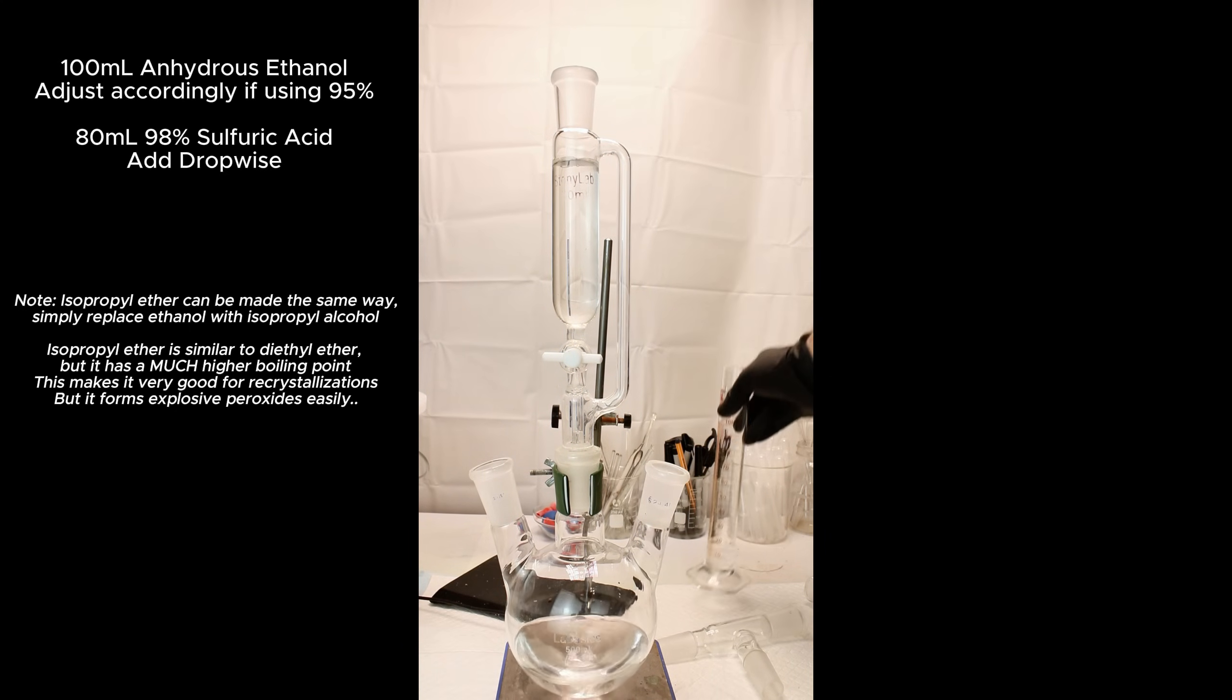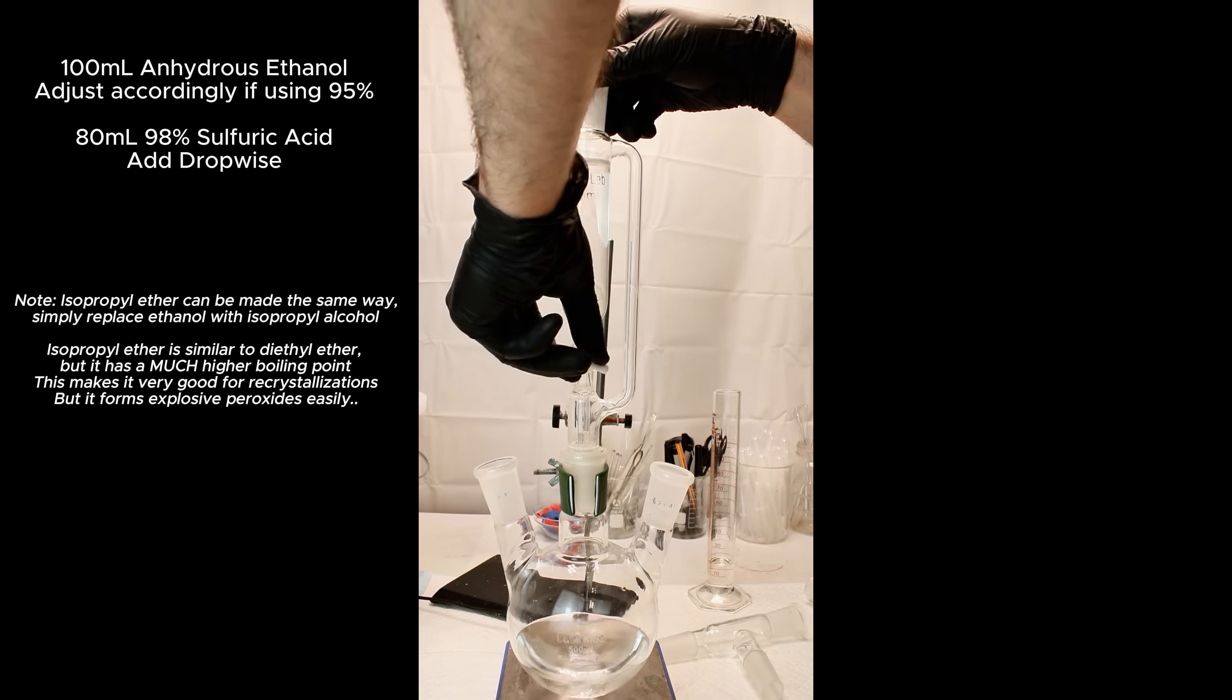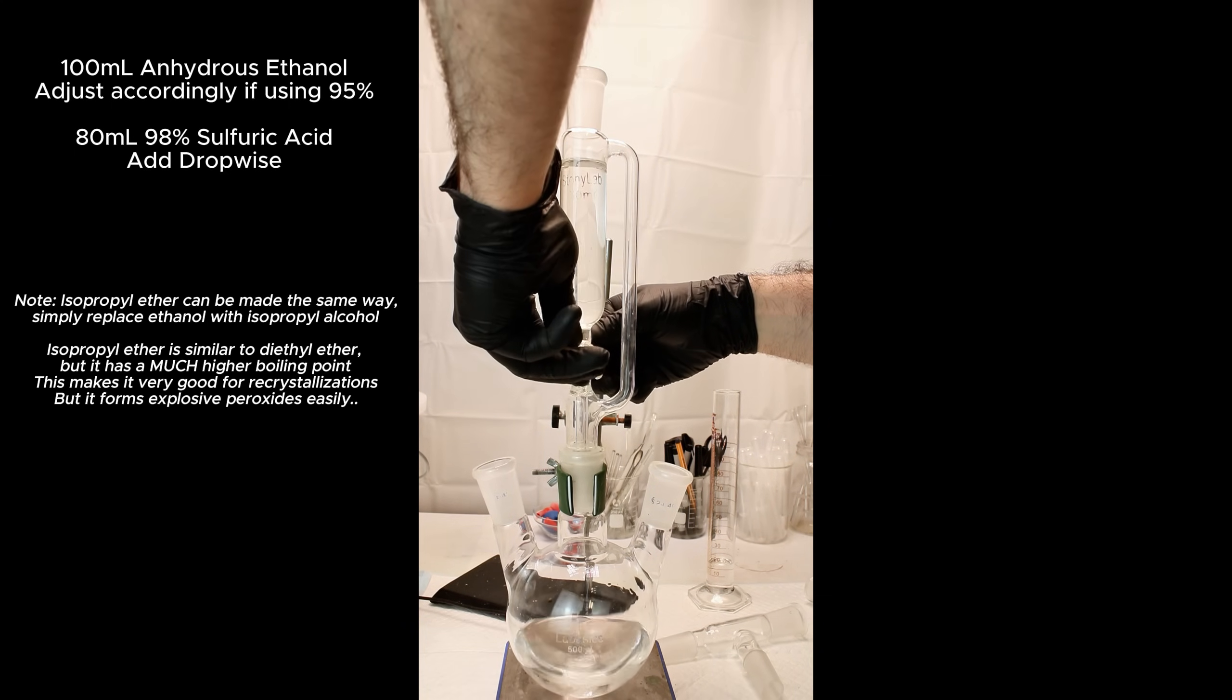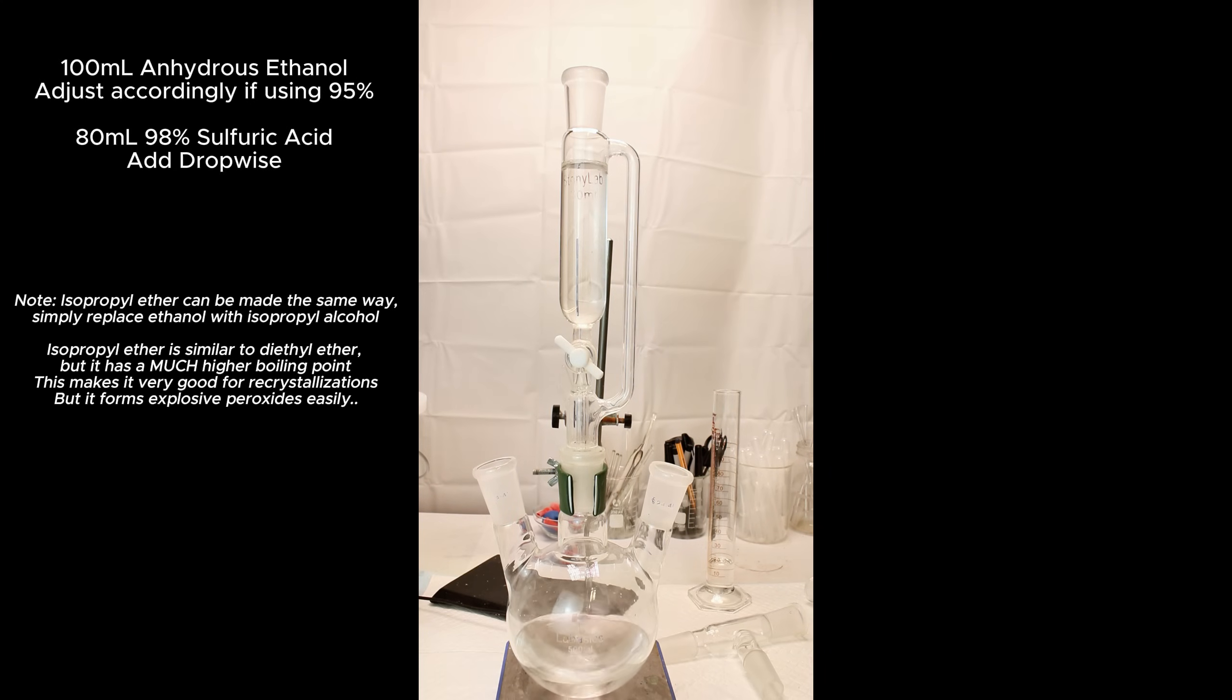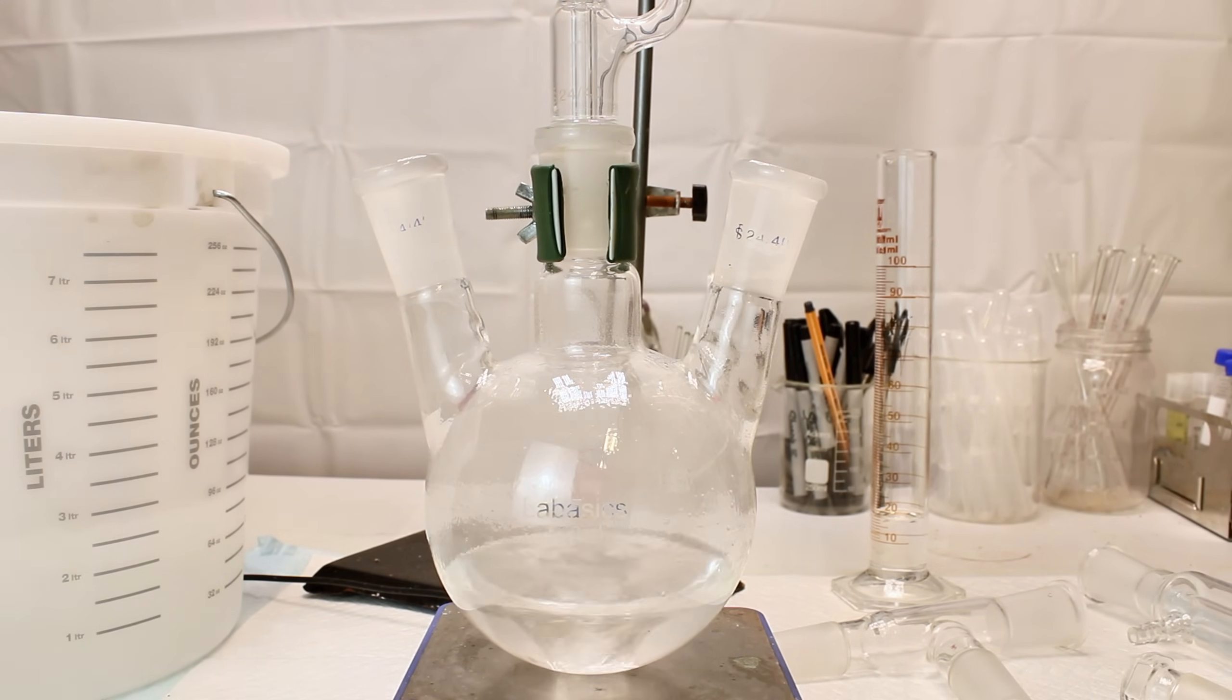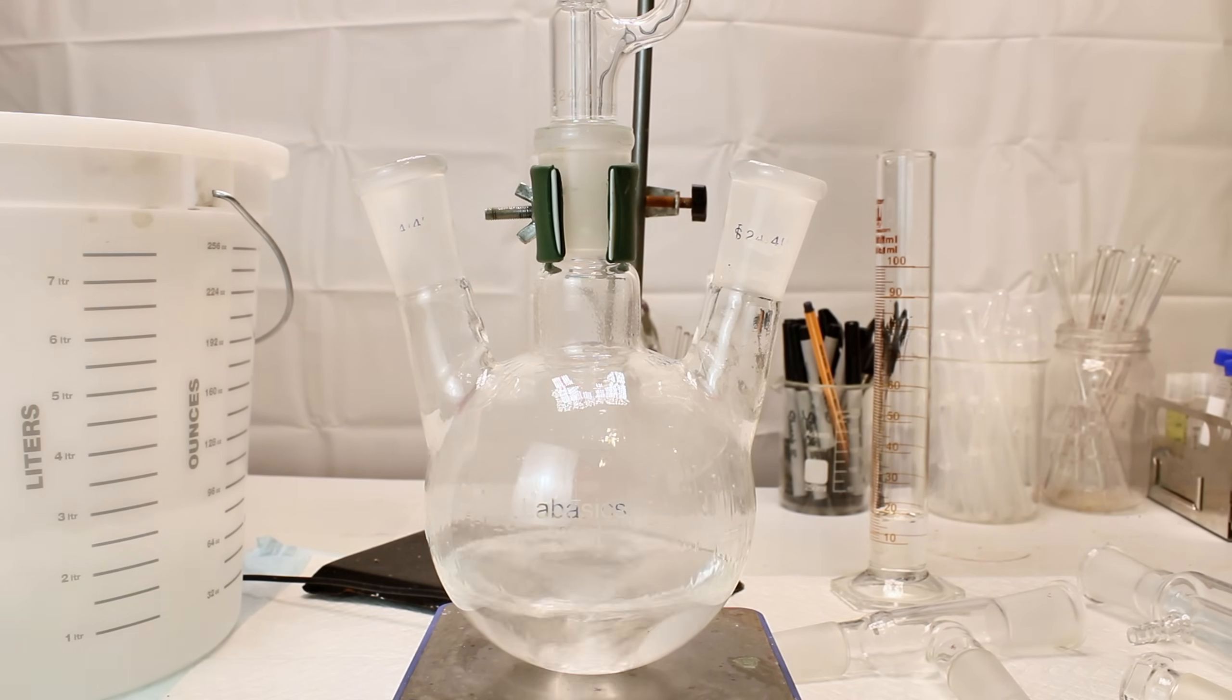I then add 80ml of concentrated 98% sulfuric acid to an addition funnel and connect it to the center neck of the boiling flask so that I can slowly add it to the ethanol dropwise. This is done because sulfuric acid generates a lot of heat when it's mixed with ethanol, and trying to add this much acid too quickly would cause it to violently boil, which could result in a loss of product or even injury.